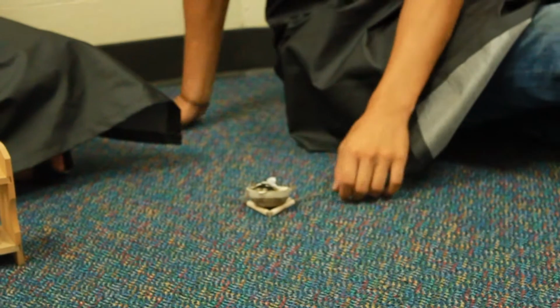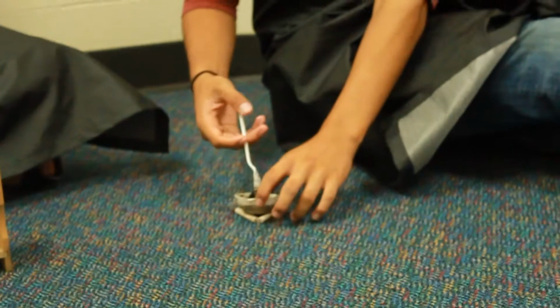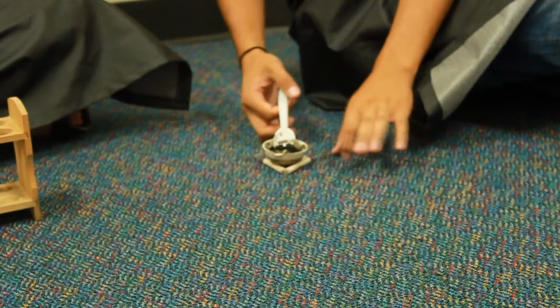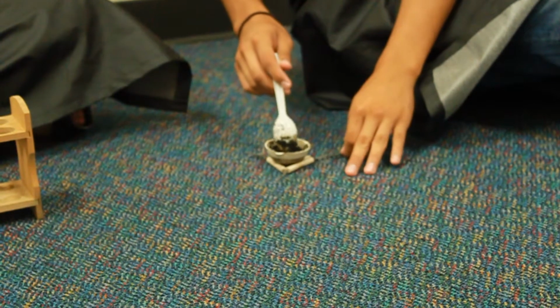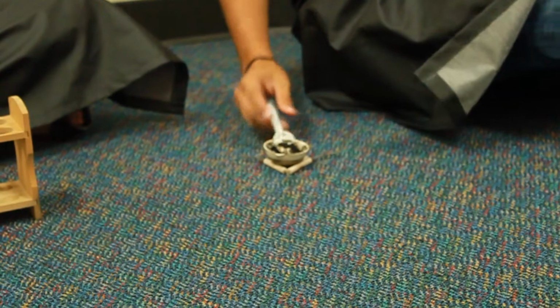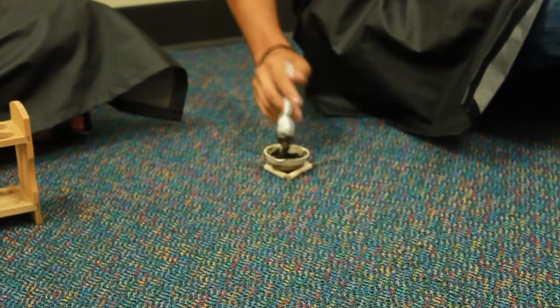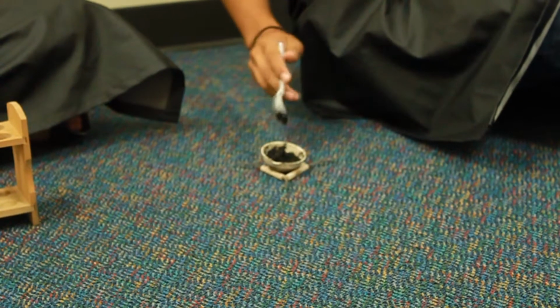After all of our experiments, this is what we came up with. Here we added potassium permanganate with 2 gummy bears, and nothing happened at first, but when we added hot water, it made an aqueous solution and caused somewhat of an exothermic reaction, and this is what happened to it.